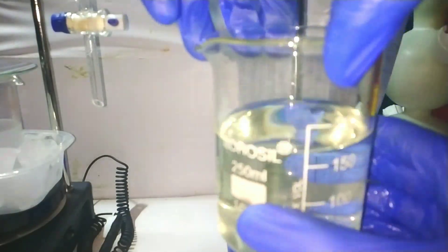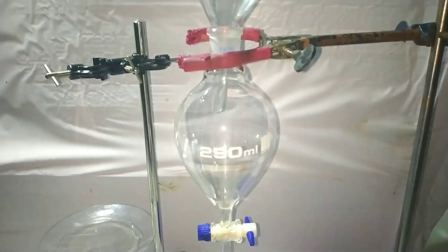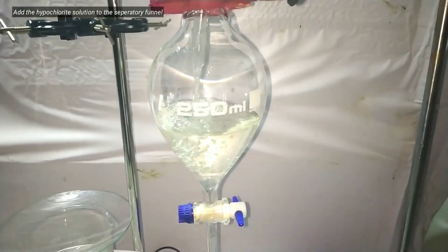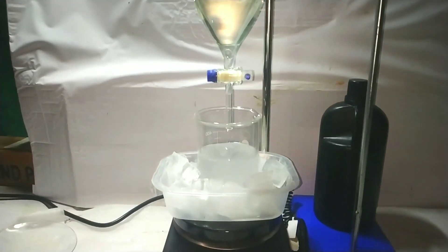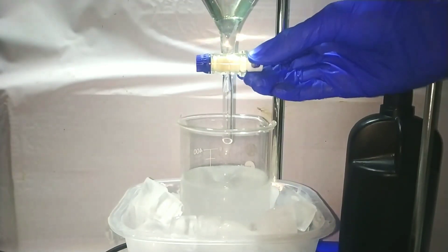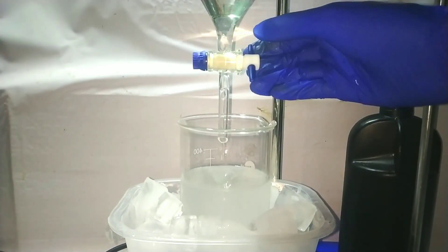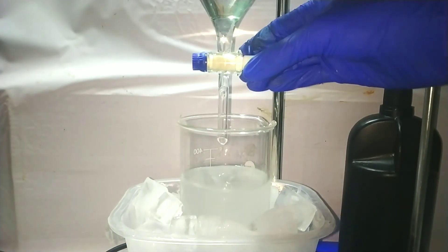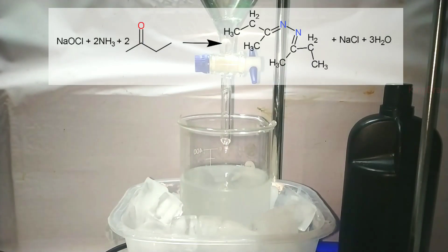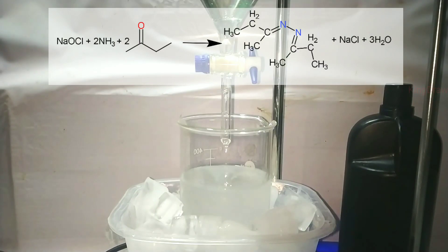Next, we need the sodium hypochlorite solution — the bleach. I have here 186 grams of 10% hypochlorite. I pour it into a separatory funnel and arrange it over the beaker containing the ammonia and methyl ethyl ketone. Slowly open the knob of the separatory funnel and let the sodium hypochlorite fall into the beaker. The major reaction happening here is ammonia reacting with methyl ethyl ketone and sodium hypochlorite to form methyl ethyl ketazine and sodium chloride.